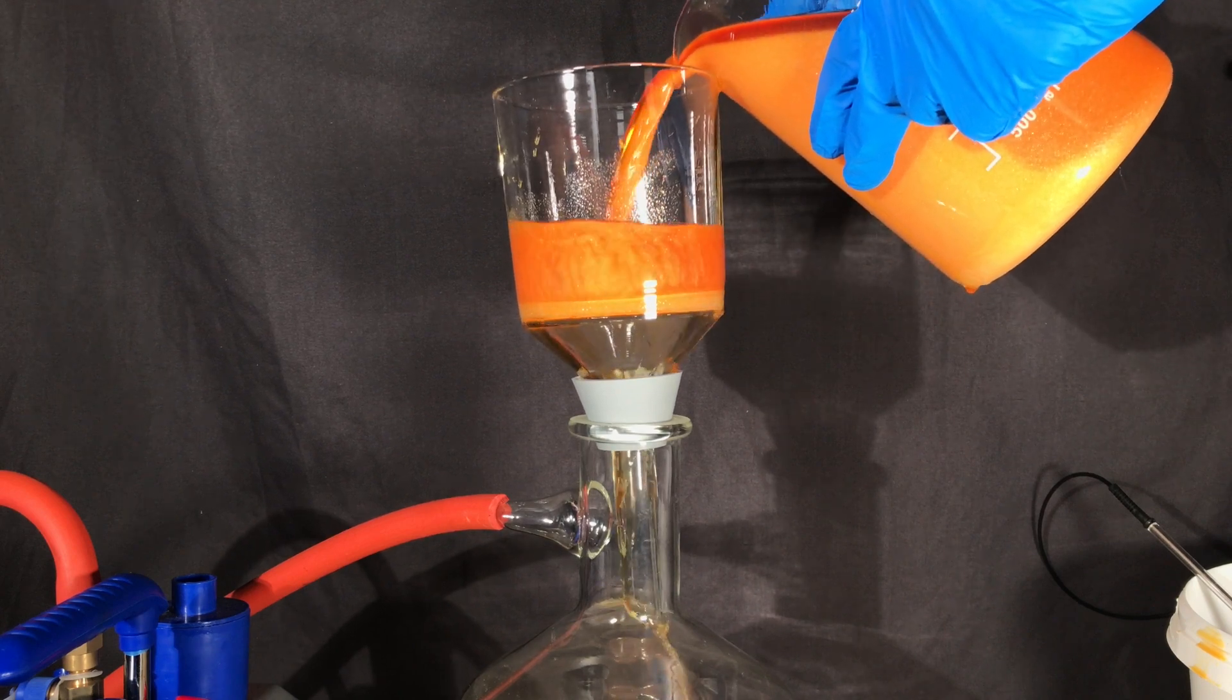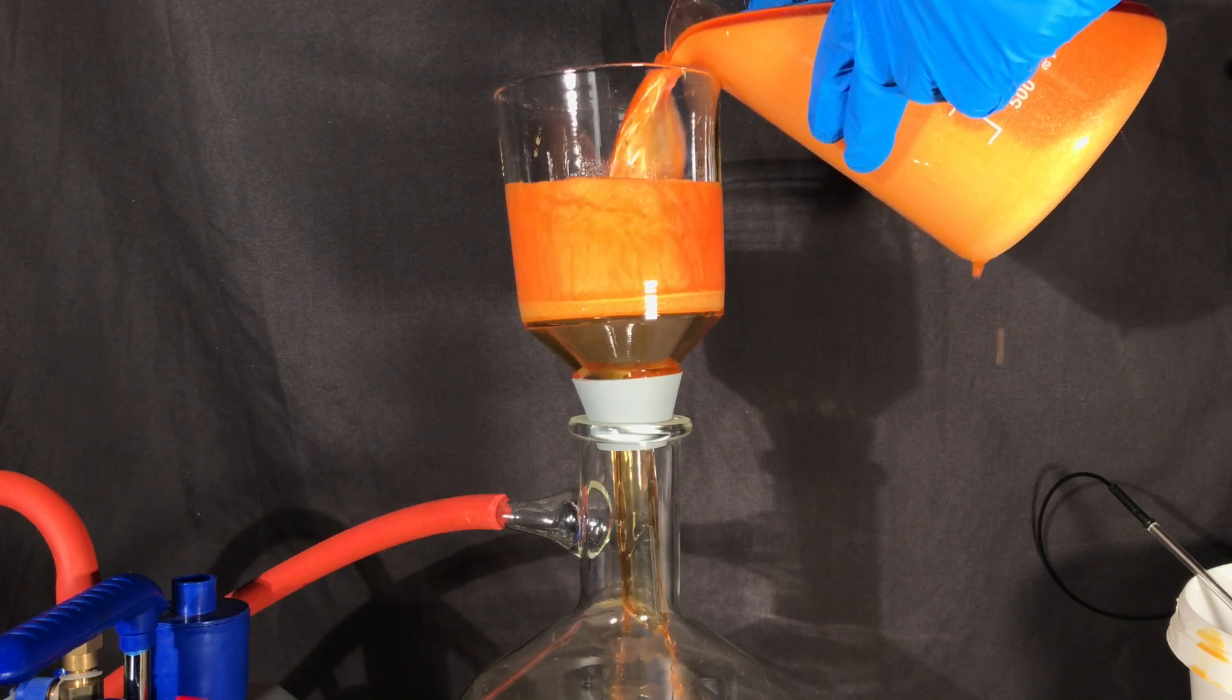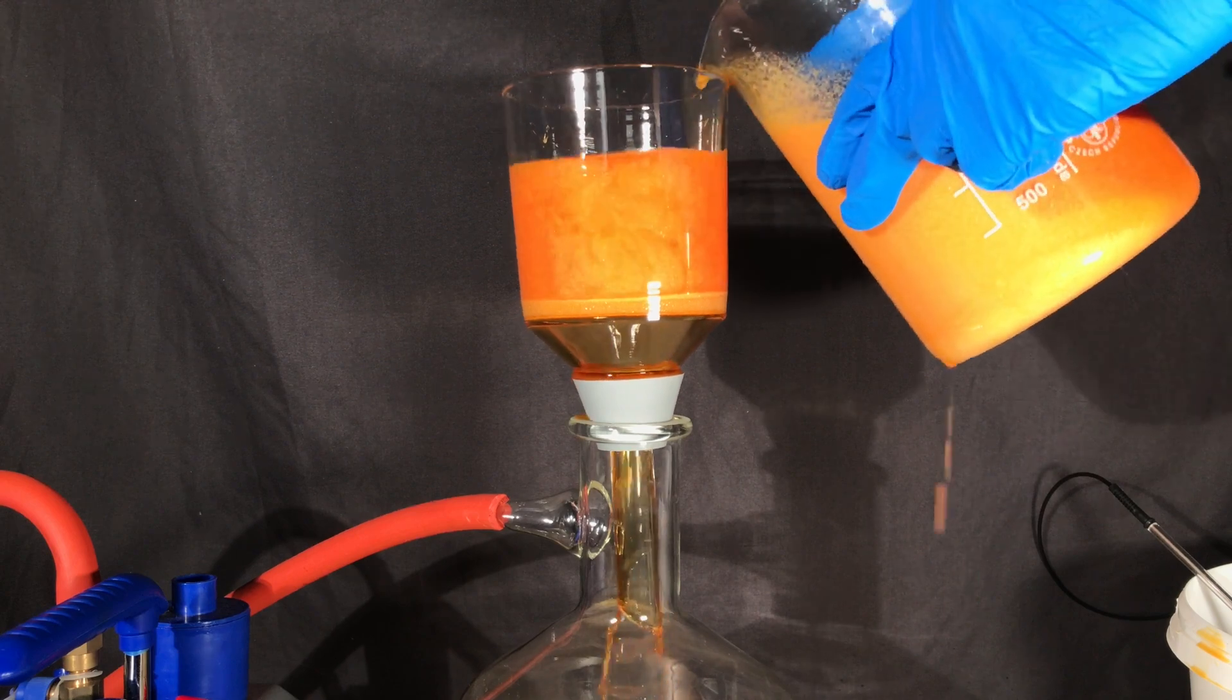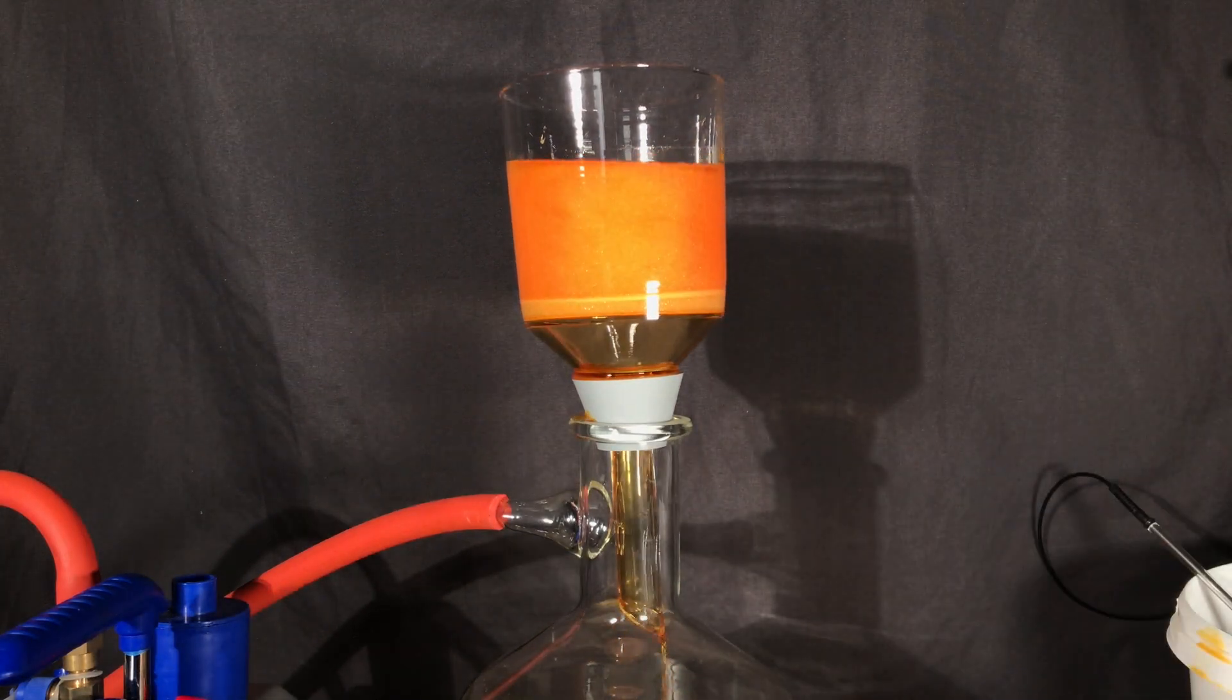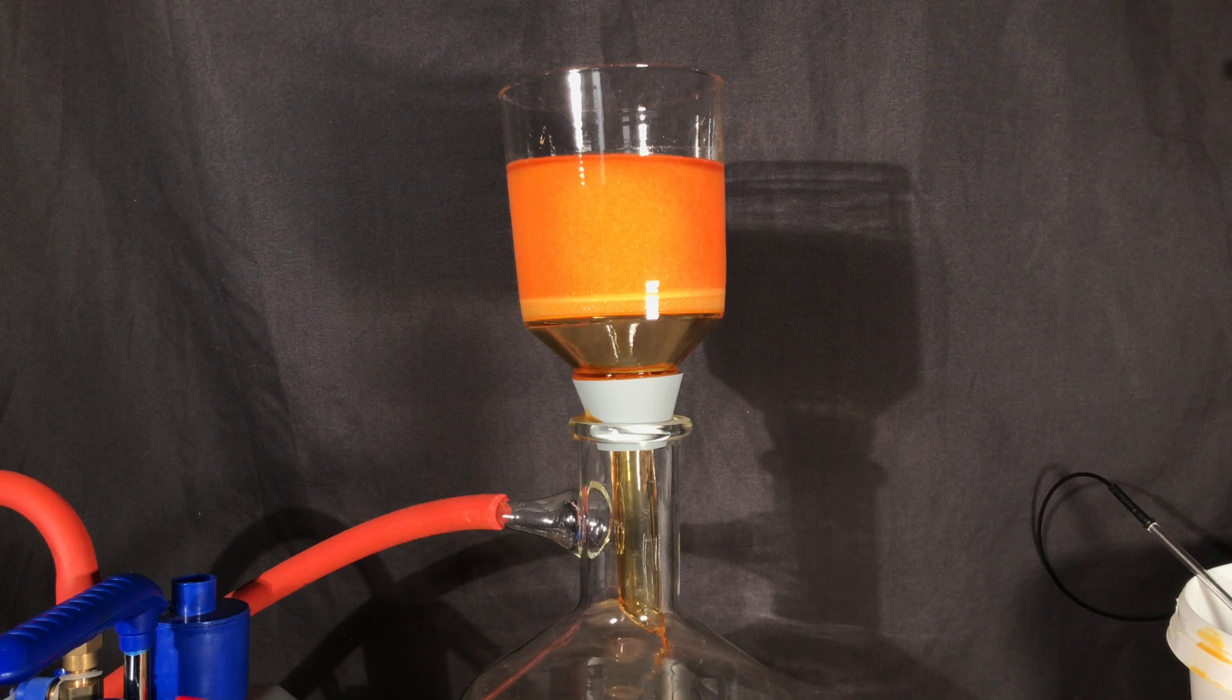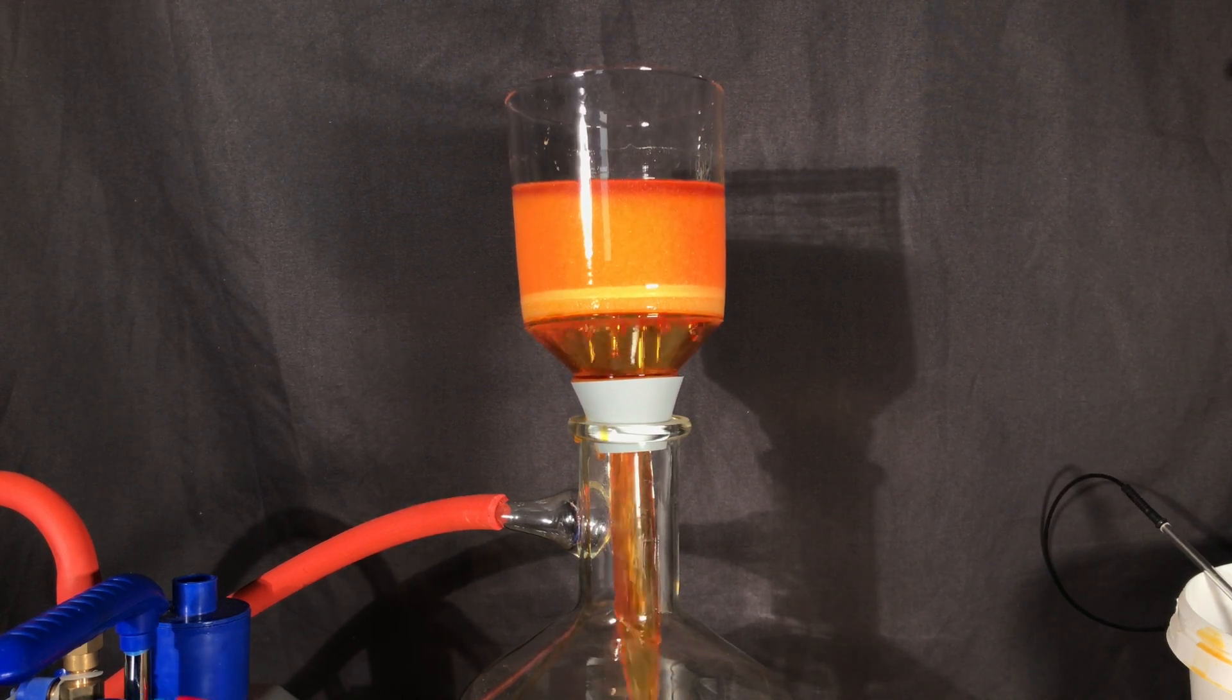I unfortunately spilled some of the solution but we ended up doing a vacuum filtration. By this step we can remove most of the methanol and the methanol still looks orange which indicates that it contains a small amount of leftover bromine.